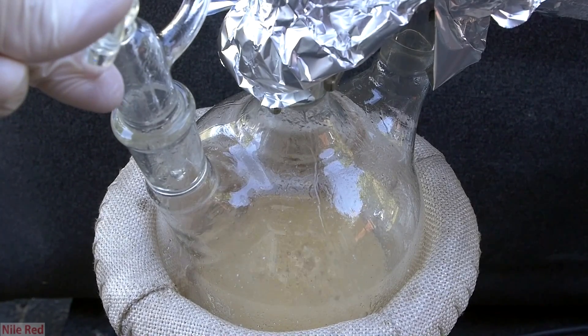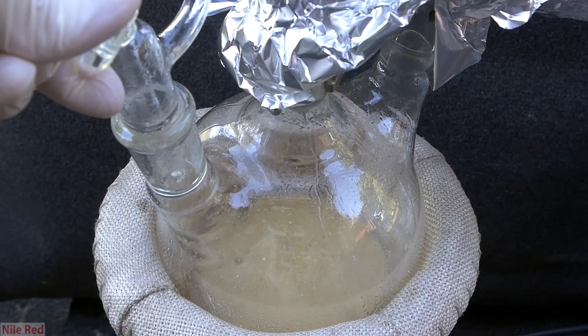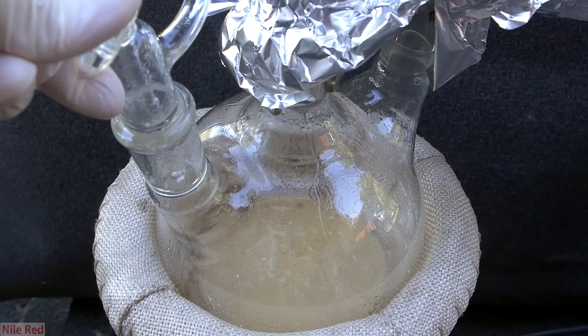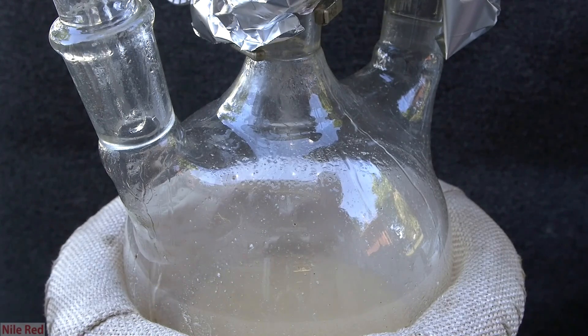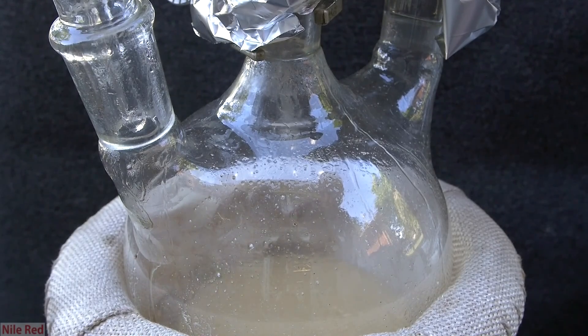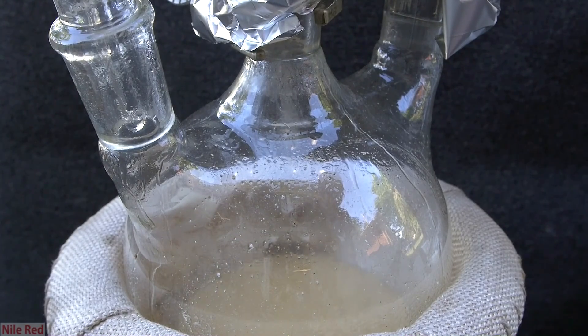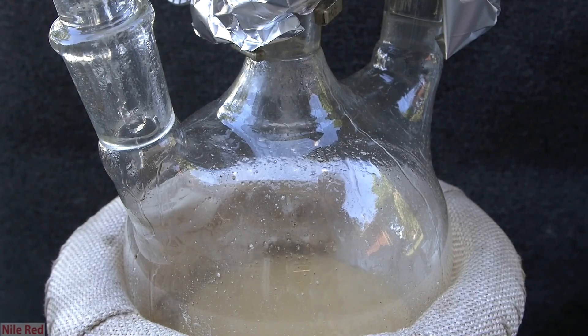In theory, we should add things at the same rate that we're collecting our acrolein in the final flask, but I found this really hard to do. Glycerol is really viscous, and with the addition funnel, I found that the drip rate was either way too fast, or way too slow. I think I gave up trying to add it at a constant drip rate, and I just added it in portions by opening the addition funnel to max for a little bit, and then closing it.